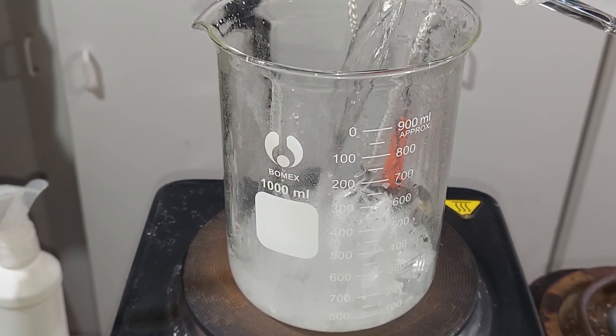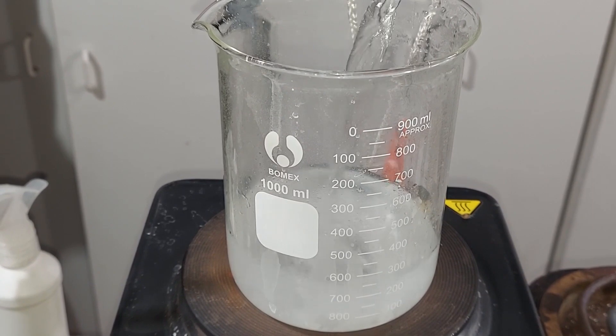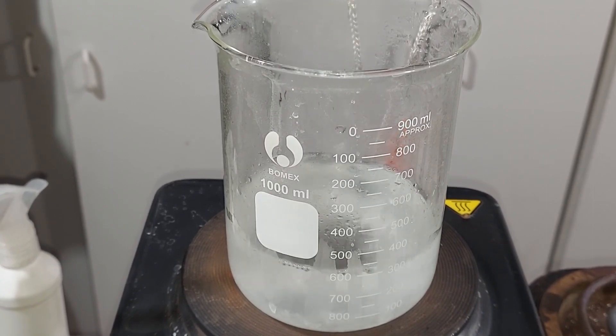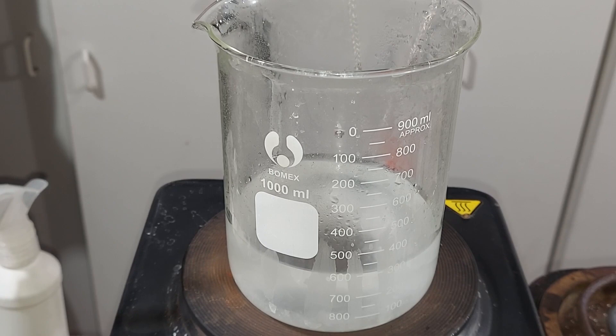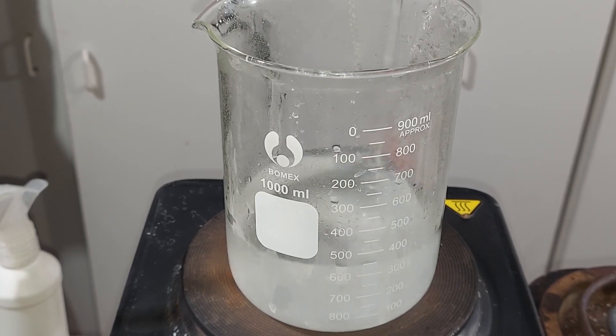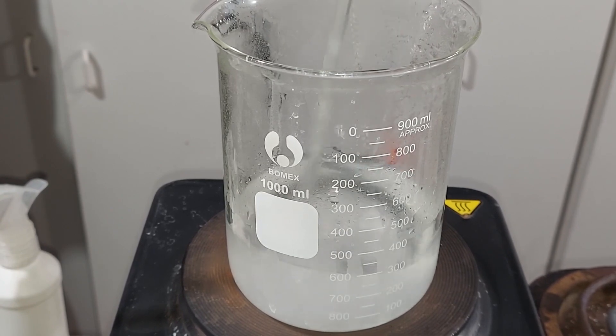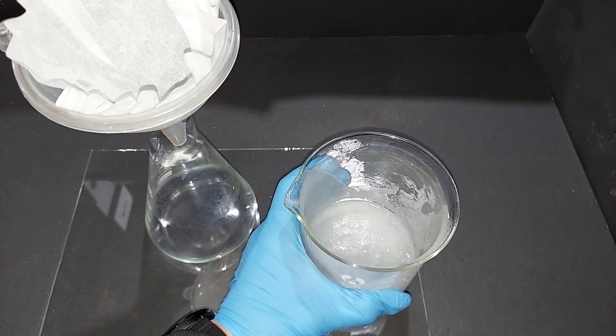Okay, this came off of a different hot plate of course. About the same amount, 225 milliliters of water, somewhere in there. The amount of water obviously is not super important, just enough to cover the crystals. I'm gonna dissolve these one more time and from here I'm just gonna throw it in the freezer again.